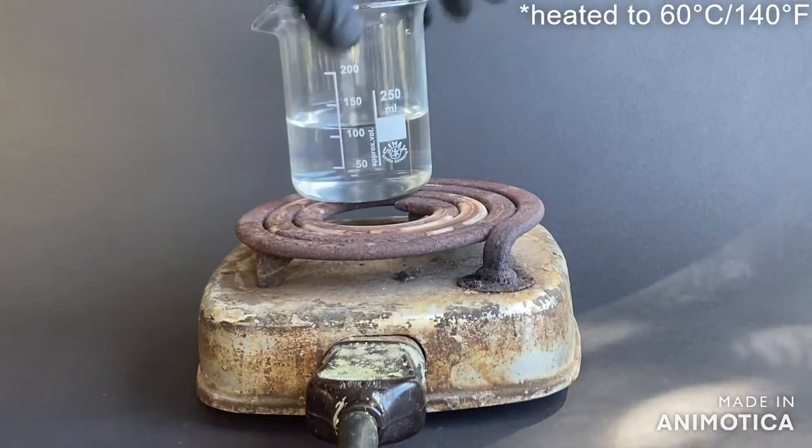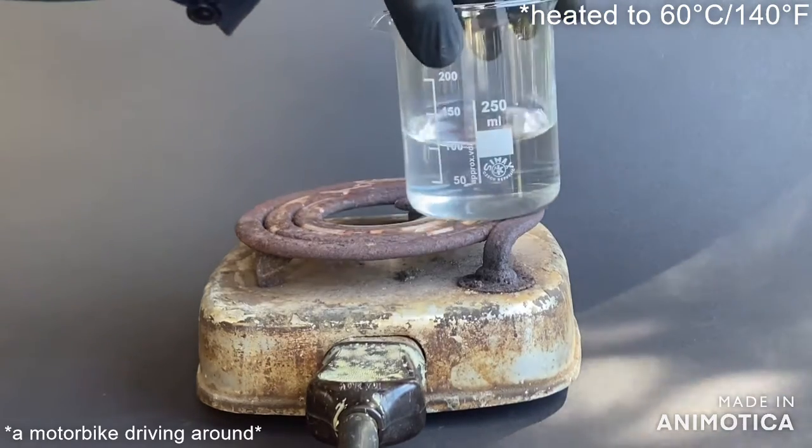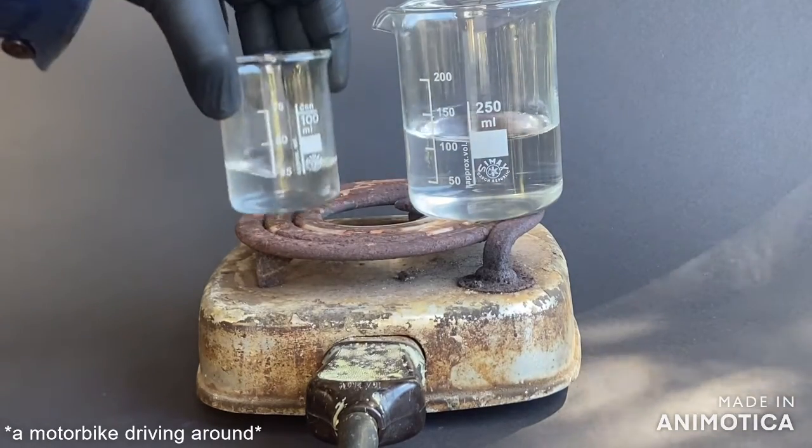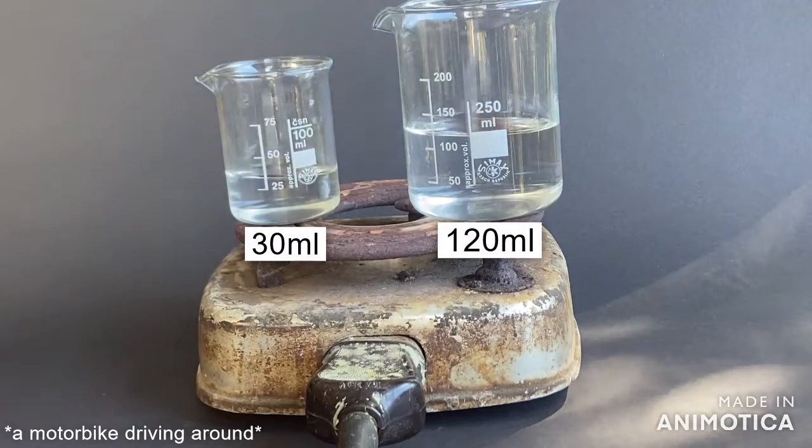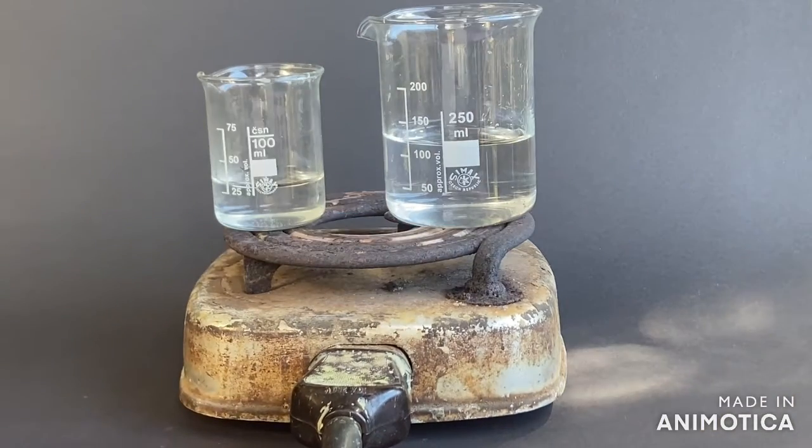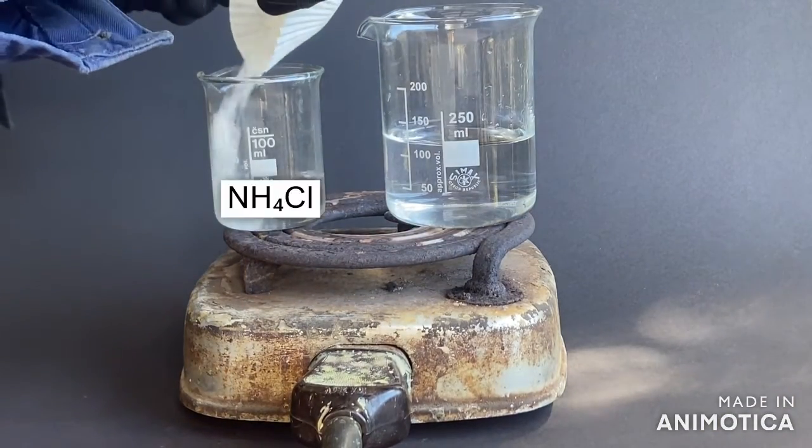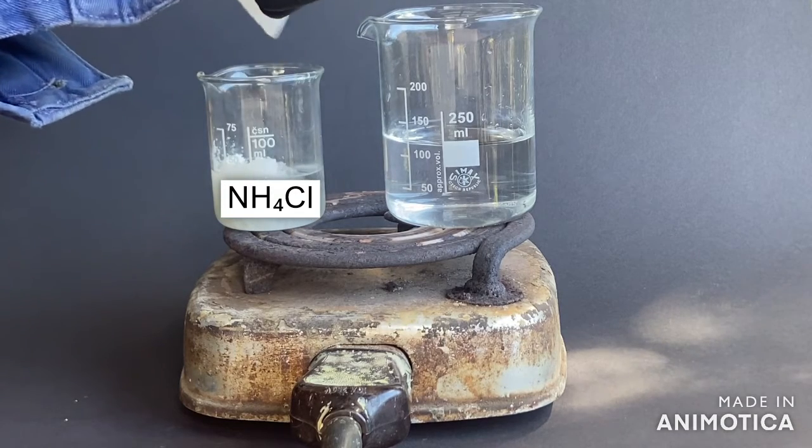First I heated two beakers with 30 milliliters of water in the first and 120 milliliters of water in the second one on my hot plate. Into the smaller one I added 15 grams of ammonium chloride.